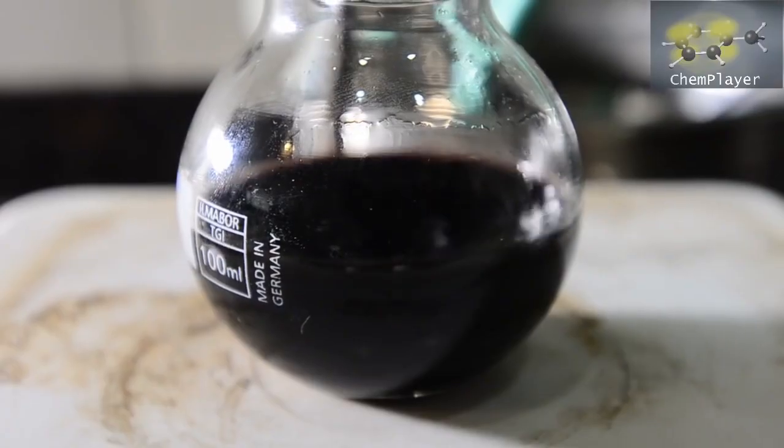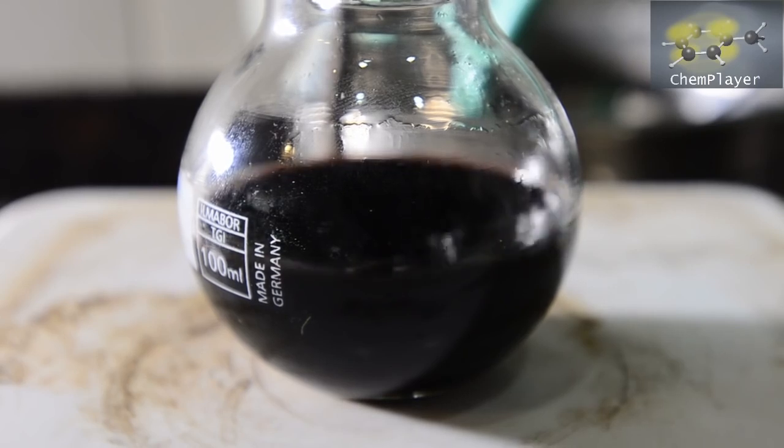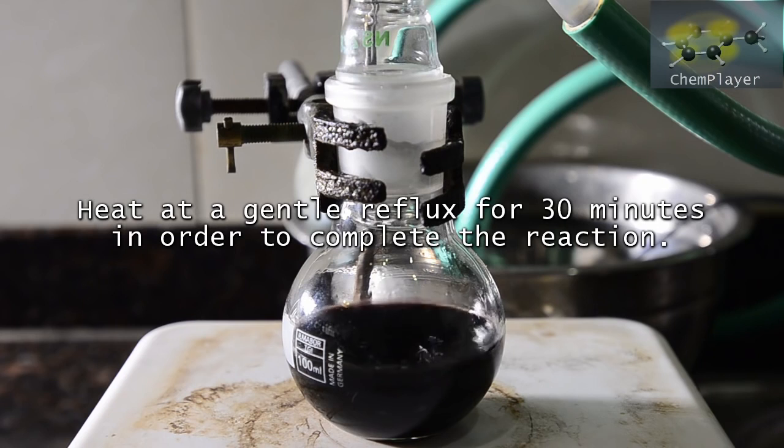At the end of the addition the color is extremely dark, and also seems to have a slight purple tint to it. Now we just need to continue heating the mixture with the methanol gently refluxing for about 30 minutes.